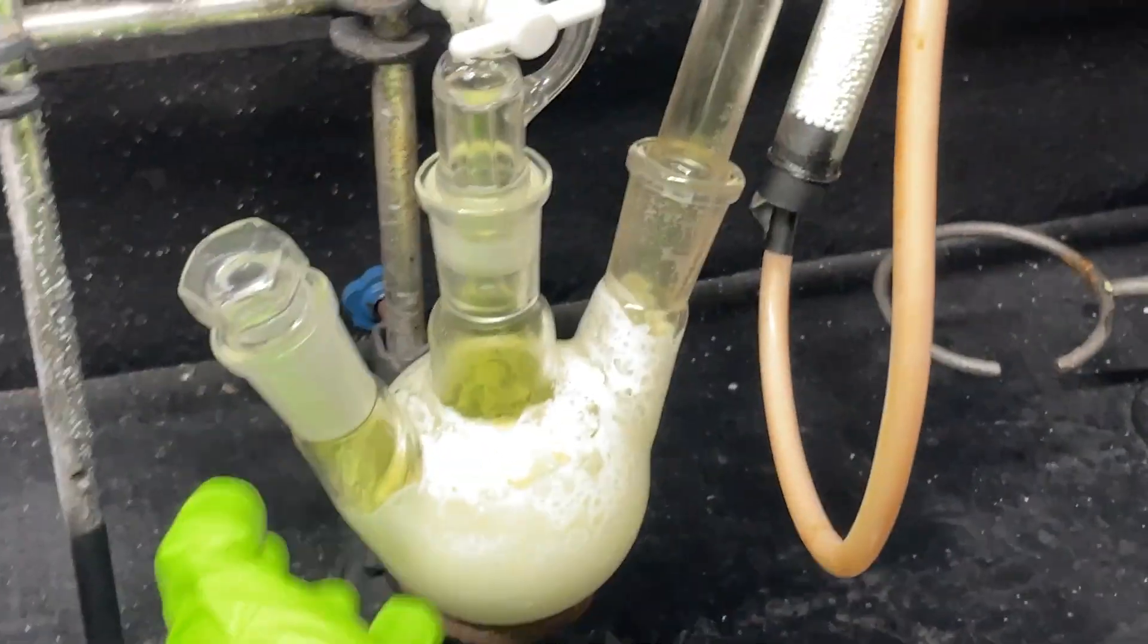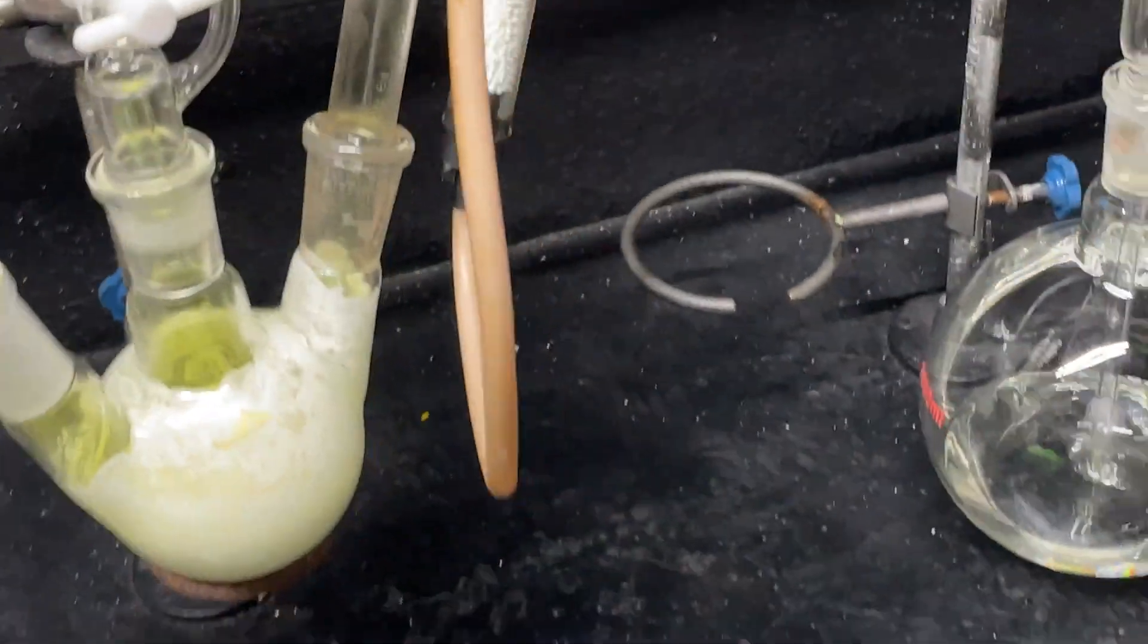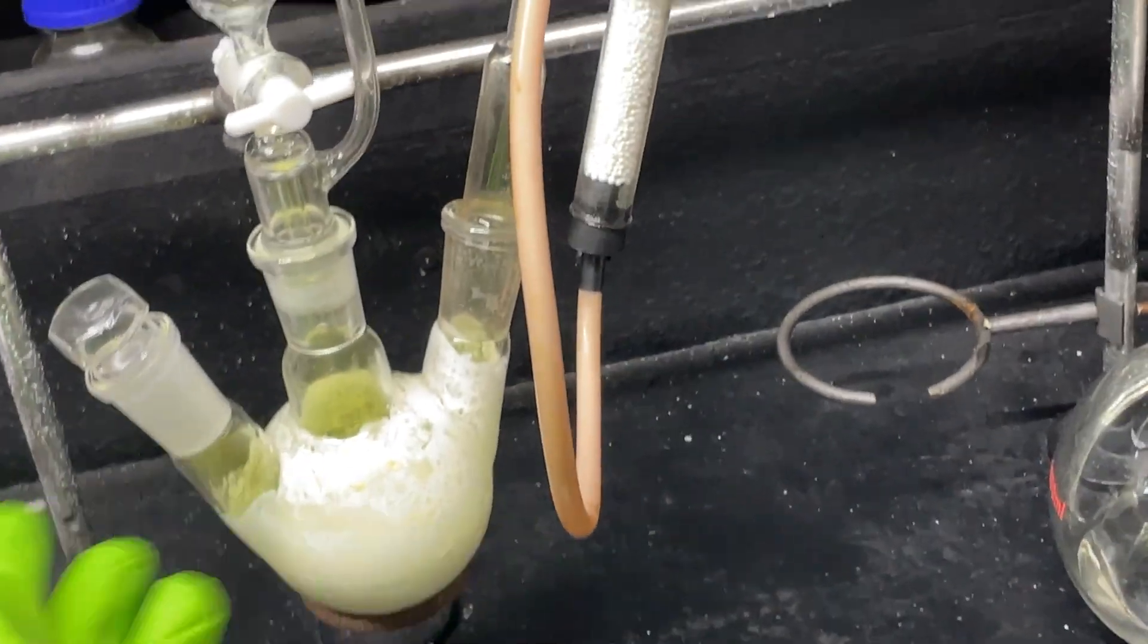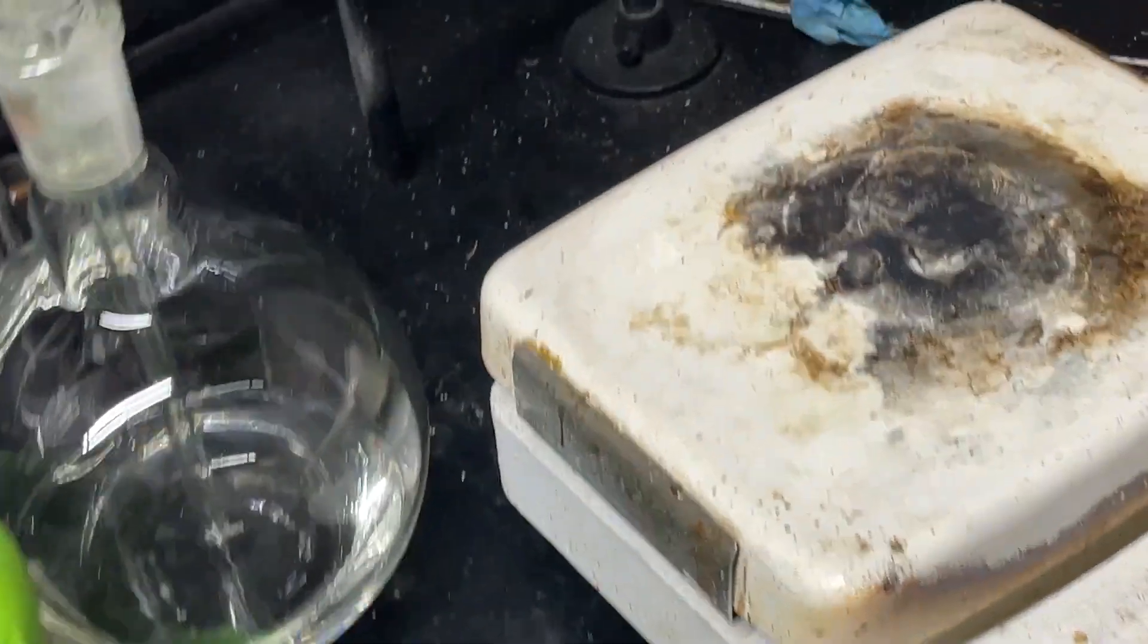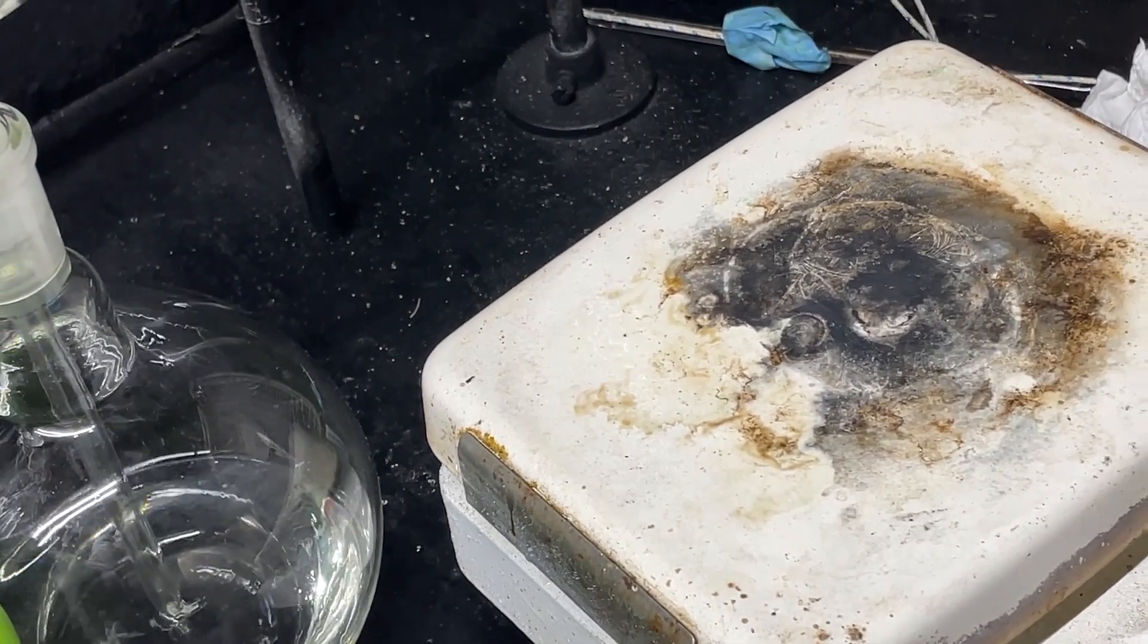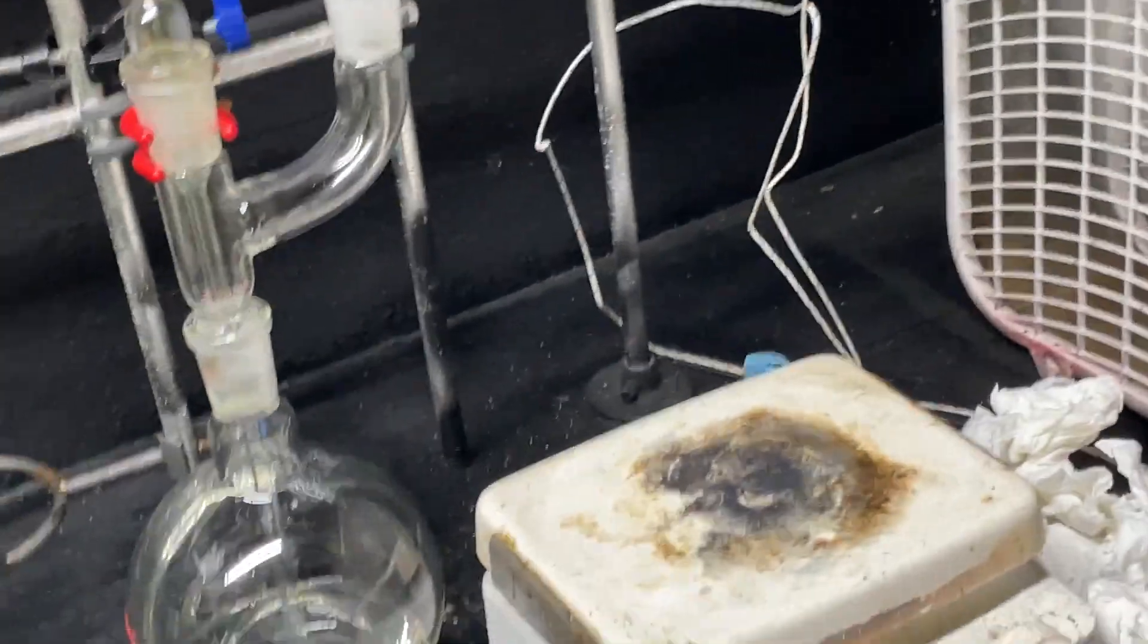All of our chlorine has been generated and all of our TCCA has been used up. I did use a molar excess over here so the chlorine that's left in there is fine. Over here we have a clear solution - it definitely warmed up a bit over time but it's not too hot.